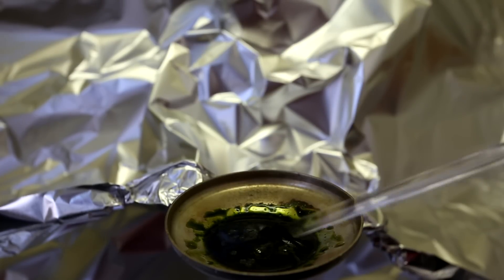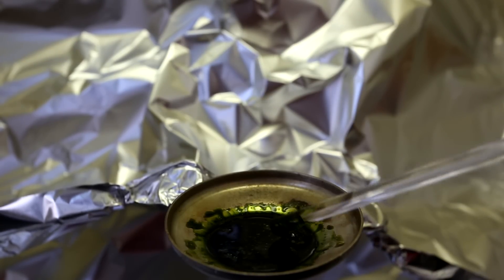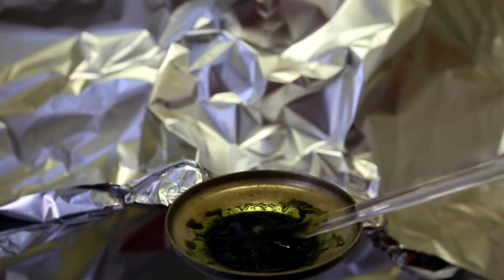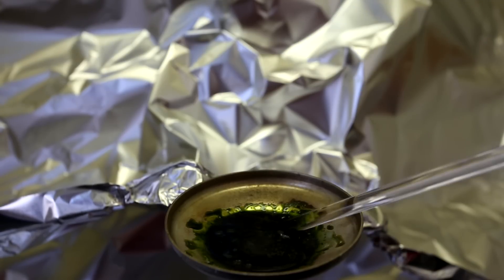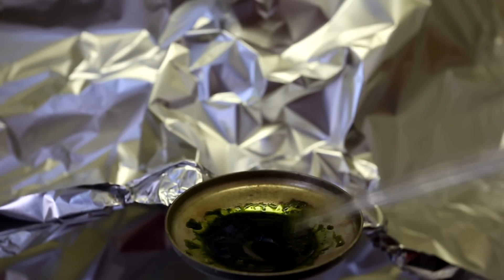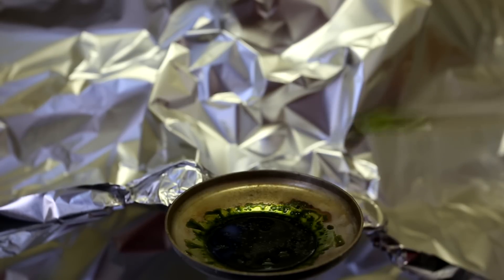Note that this must only be synthesized in an appropriate container. Only carry this out using a glass or metal container as the manganese heptoxide will oxidize any organic material. So definitely do not carry this out in anything made of plastic.